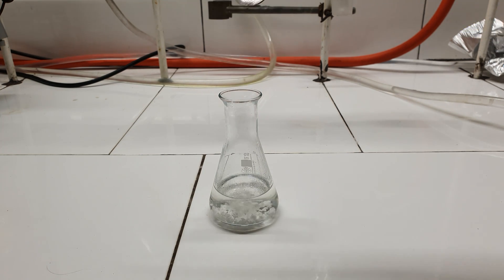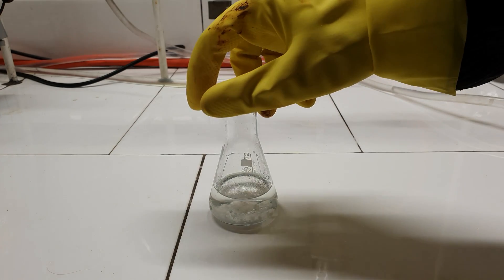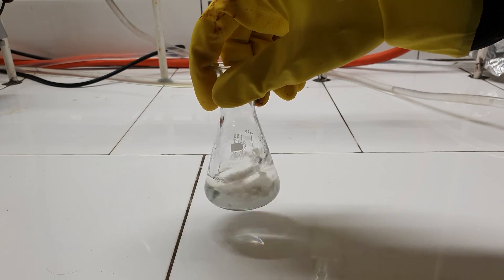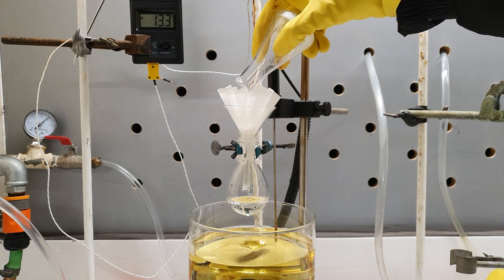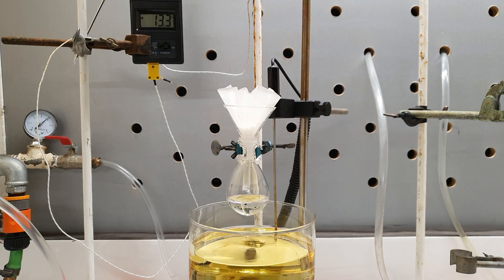I added some anhydrous sodium sulfate to it to dry it completely. After about 30 minutes, I filtered it through a filter paper.